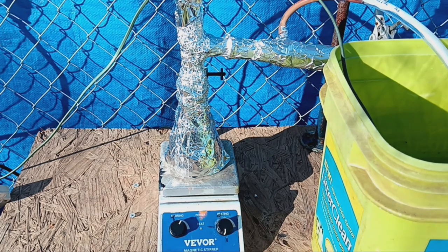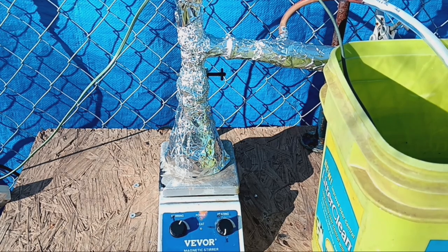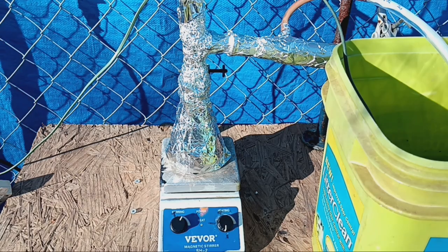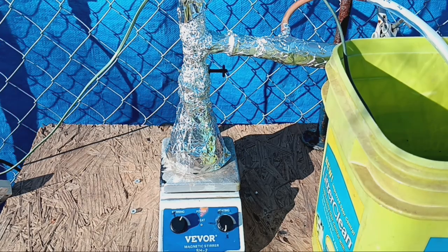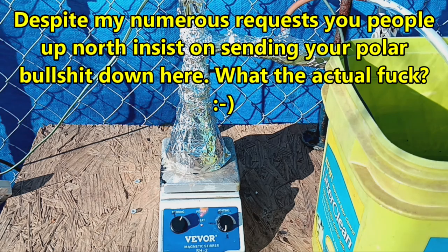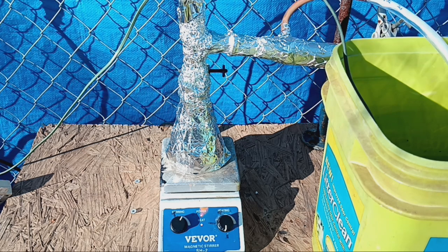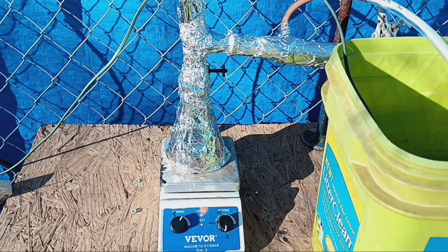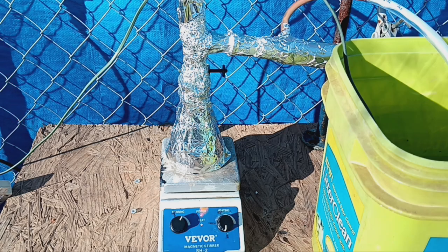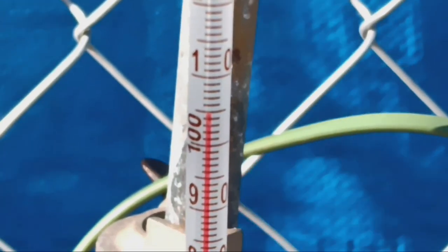I'll come back when there's something to report. It's easier to do this when it's dark outside, but it's been getting down to arctic hellscape temperatures — under 27 degrees this morning with frost on the ground. So that didn't quite work out, but the foil should keep all the light off of it.